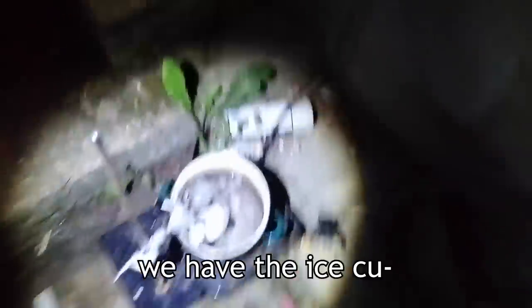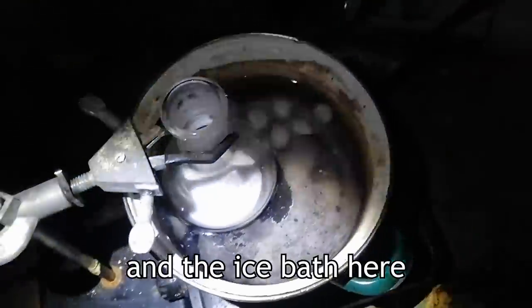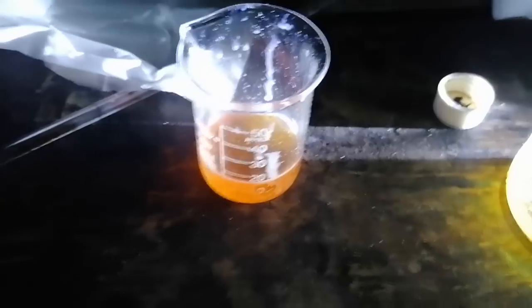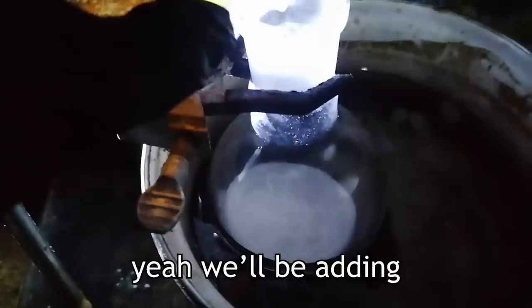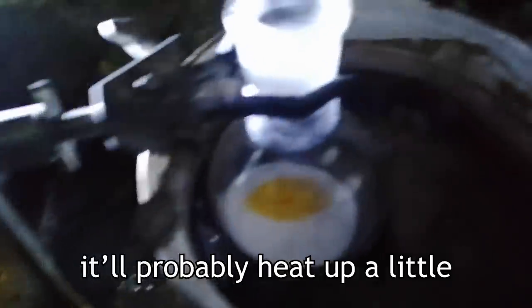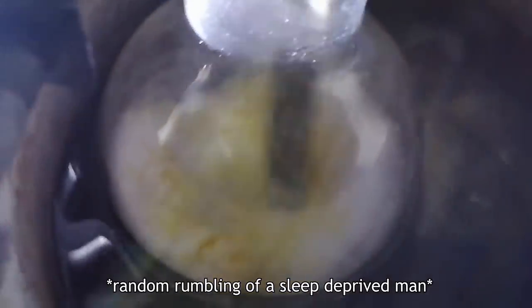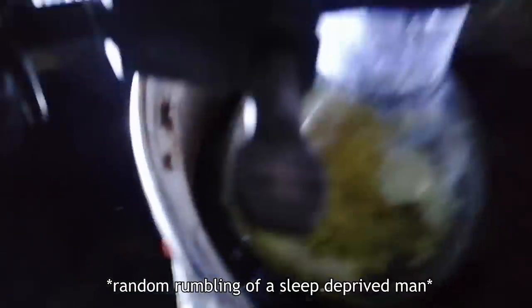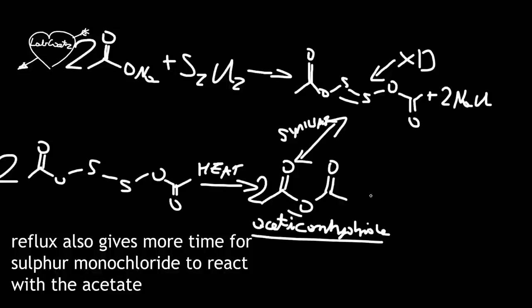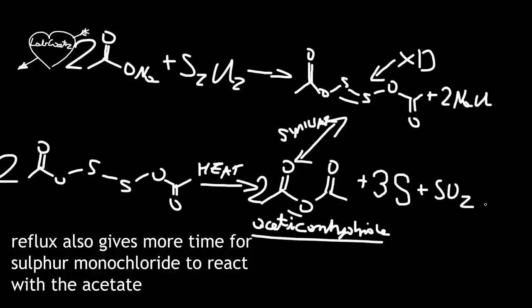We're here on the porch in the dead of night. I have the ice bath set up, and I'm about to load about 10 ml of that dreadful sulfur chlorides. You can see it has the nice color of sulfur monochloride, not the dichloride which I hate. Adding a little bit of the sulfur chlorides now — it doesn't seem as reactive as I thought. I've just turned on the heat and it's going to start boiling in a minute. The main advantage of the boiling water bath reflux is that we can keep it at a sweet spot where the reaction safely occurs and most of the sulfur chlorides react with the acetate.